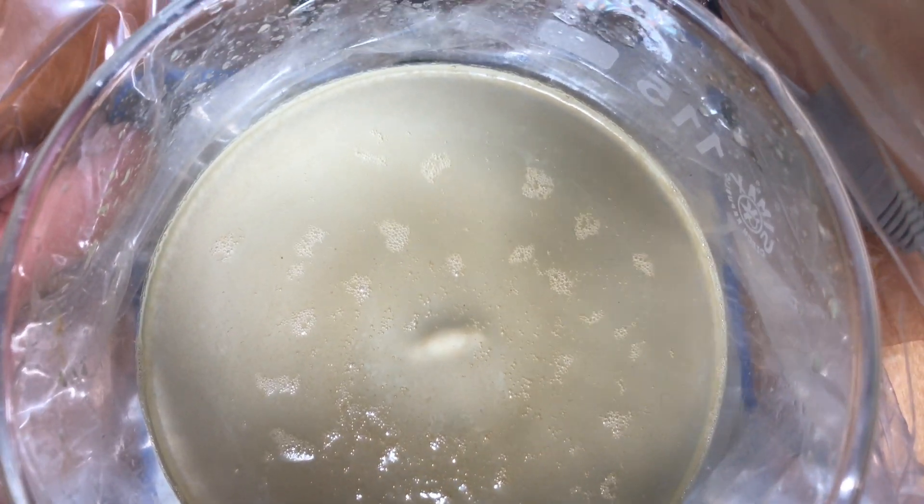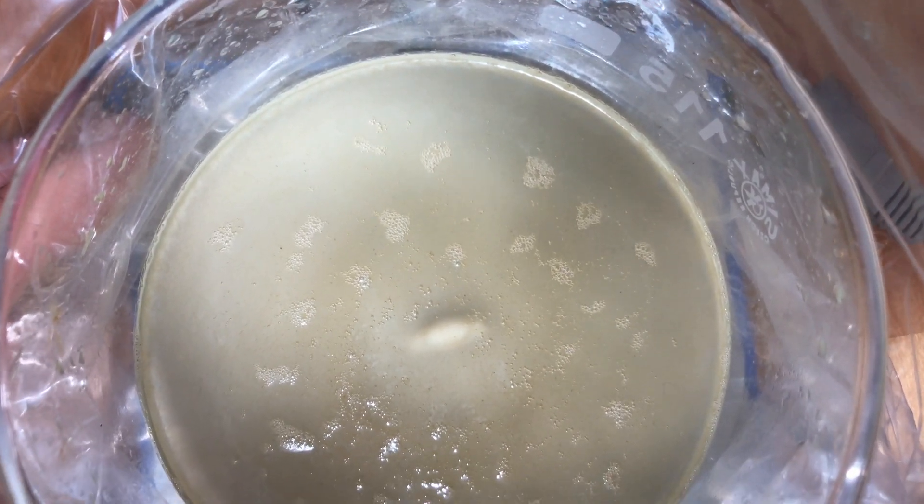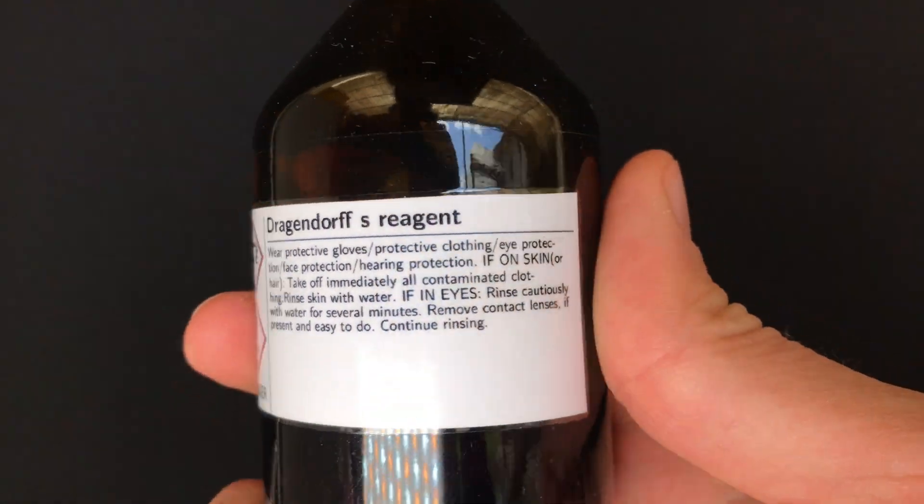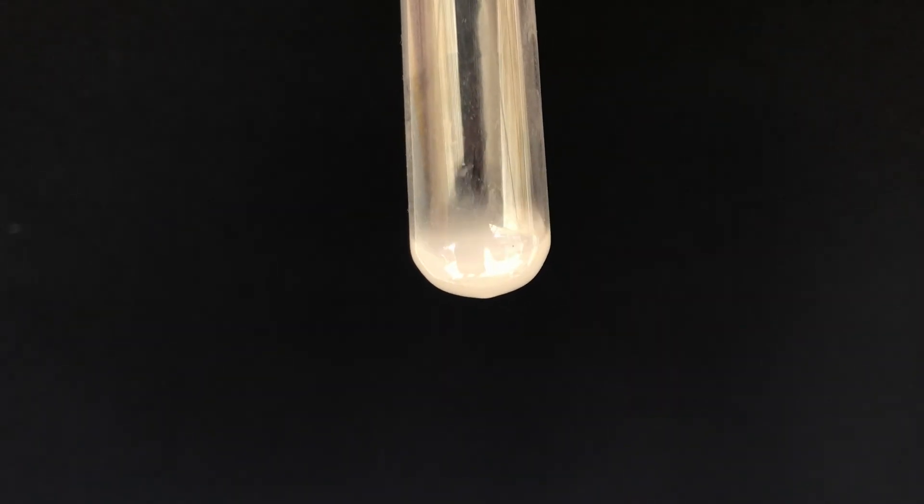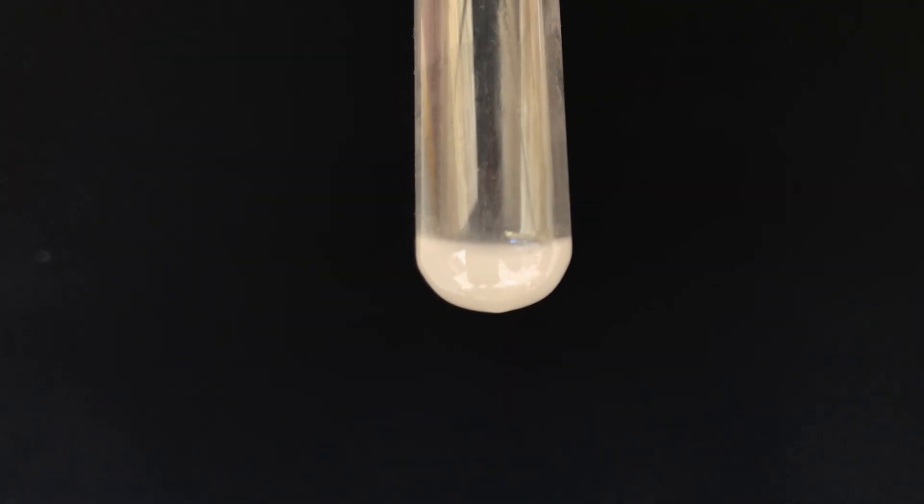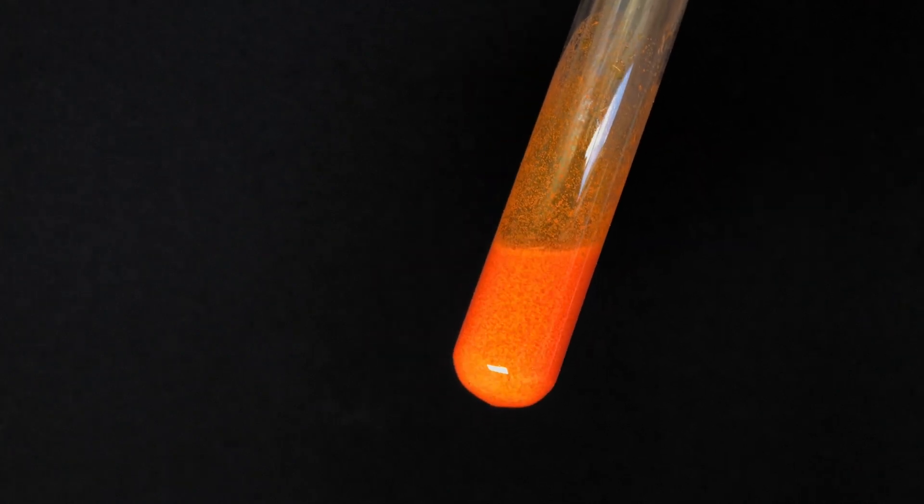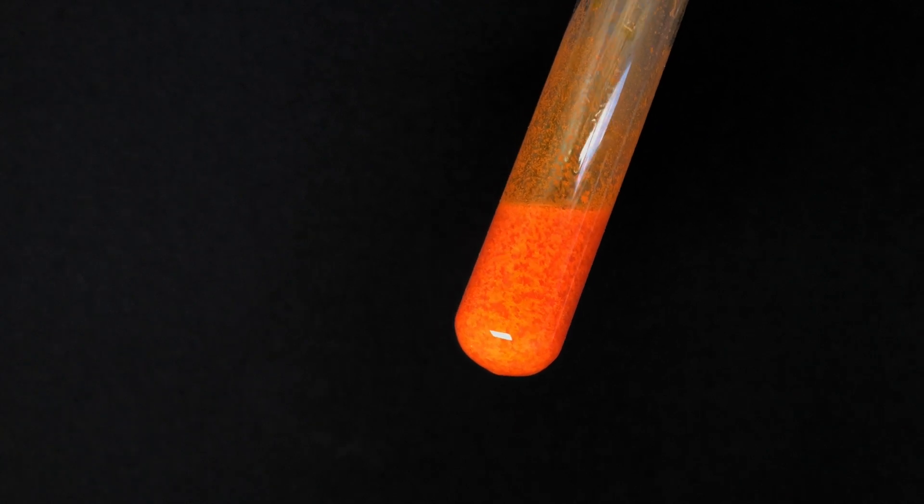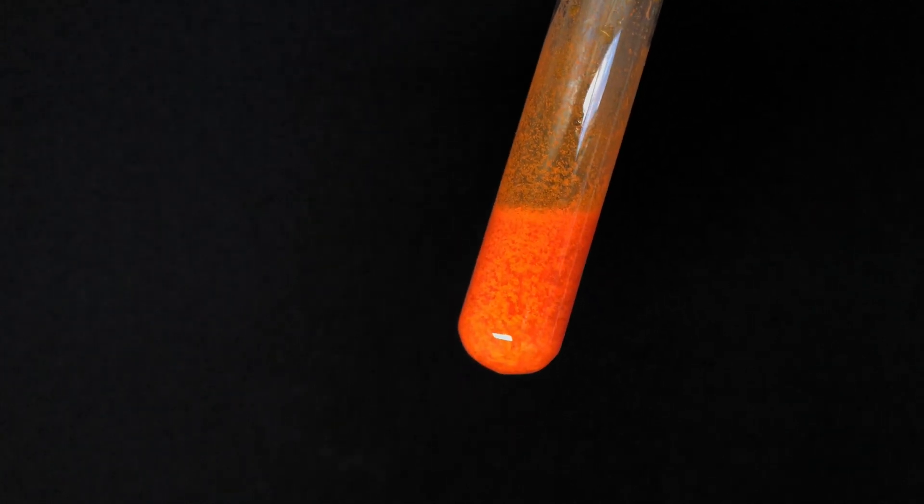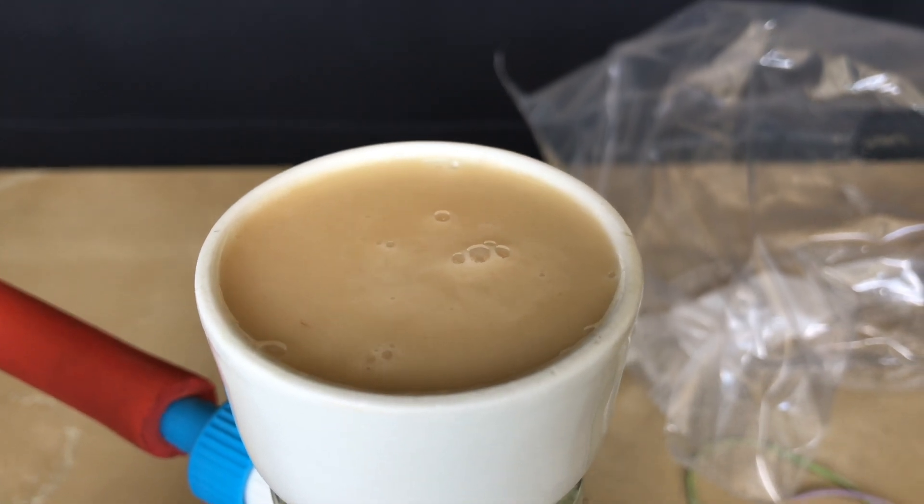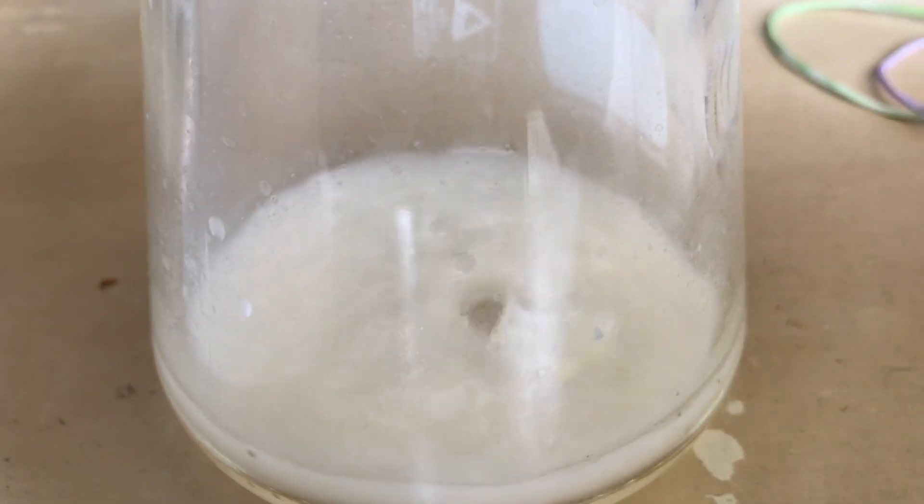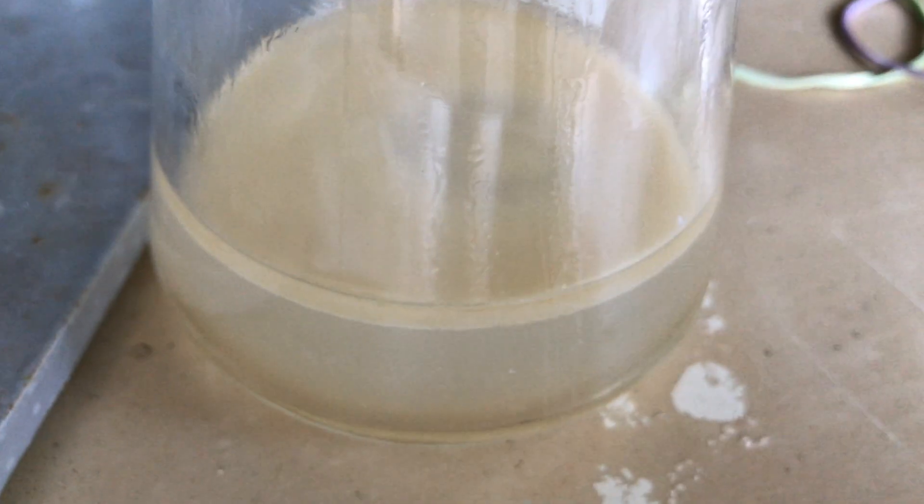As it still did not want to dry, I tried to freebase it by adding sodium bicarbonate solution, but I guessed that we messed up. It didn't look good anymore and I think that we messed up by adding hydrogen chloride gas and not precipitating the freebase in water. I decided to test for the presence of alkaloids anyways by adding Dragendorff's reagent. If your solution turns red and a precipitate forms, there are alkaloids present and we got a positive. To try to save at least some product, it was vacuum filtered and washed with distilled water. In the end everything went through the filter and we got 0% yields, but we know that there are alkaloids present.